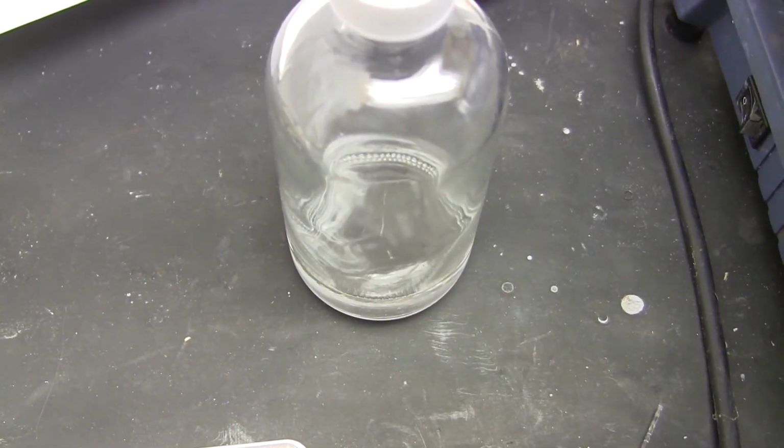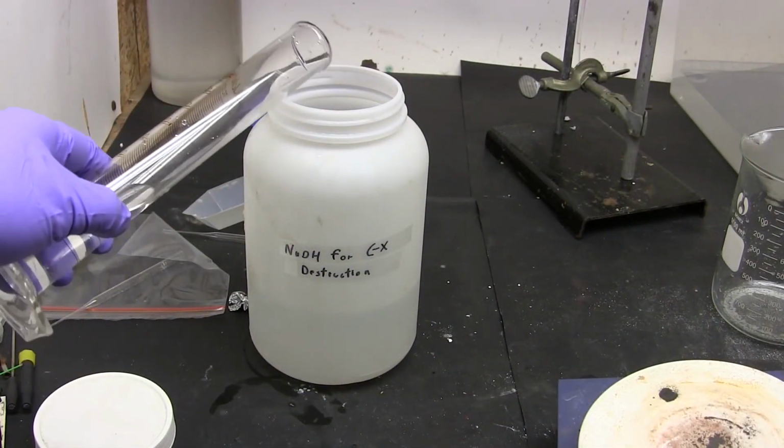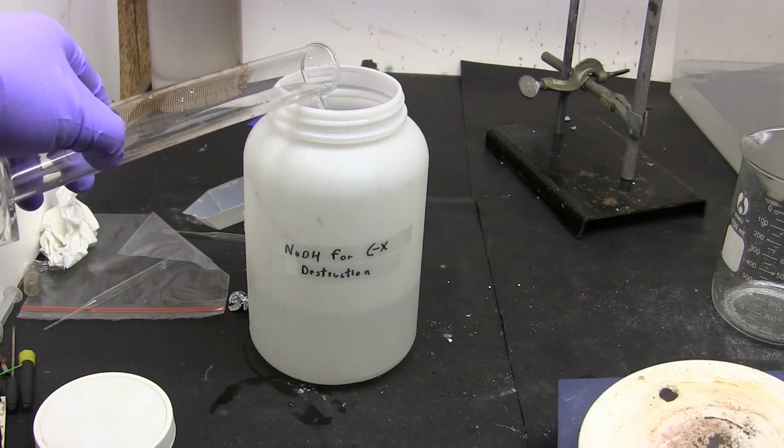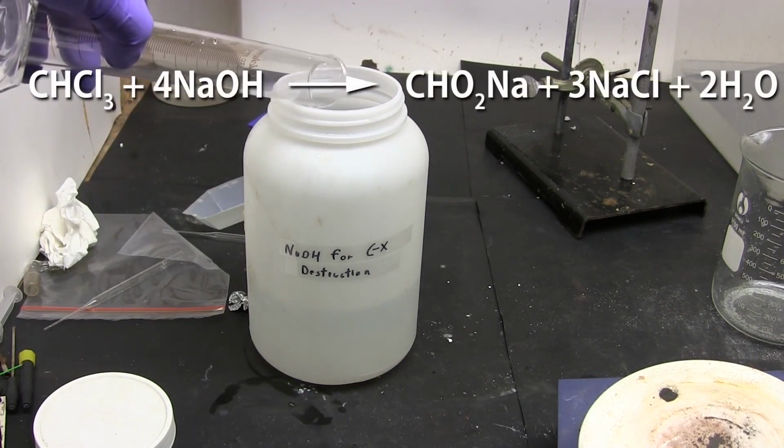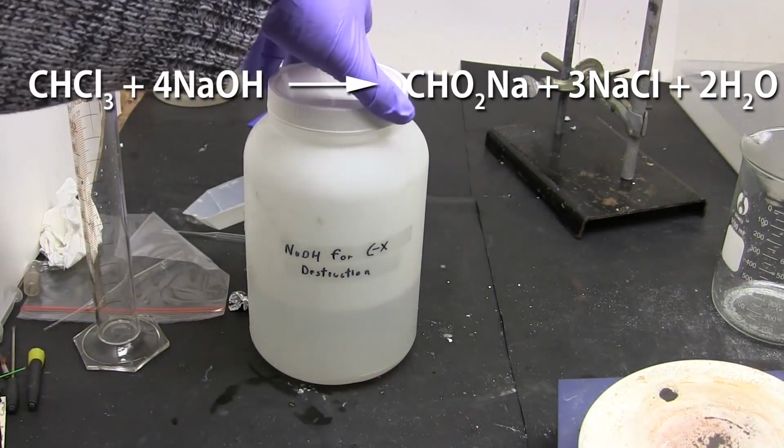Now, if you have chloroform that you don't want to deal with anymore and you want to get rid of it, you can destroy it by mixing it with concentrated sodium hydroxide and letting it sit for a few days. Sodium hydroxide reacts with chloroform to create sodium formate, which is benign, and salt. A lot of halogenated compounds can actually be destroyed this way.